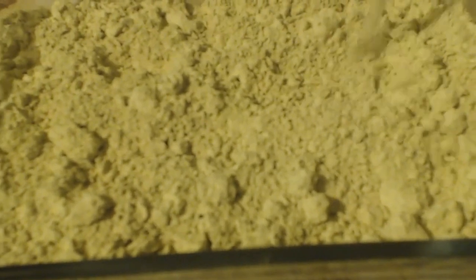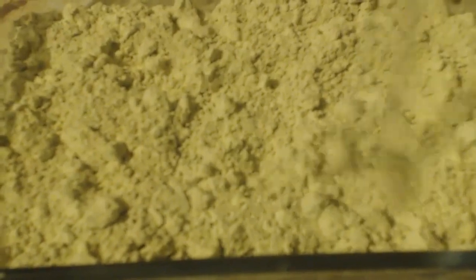Now this has only been sitting here about 10 minutes. You can see it's already turned yellow to gray. Probably the silver. Same way with this cup. Look at how it's gray now. The stuff in here is gray now. It's not yellow. Now here's the silver bromide. You can see it's nice and yellow. When I filtered it like that, after I got done washing it and everything, I stirred it all up and got all the pieces and chunks, so that I can suck all the water out with the vacuum filter. So anyways, now the liquid is over here.